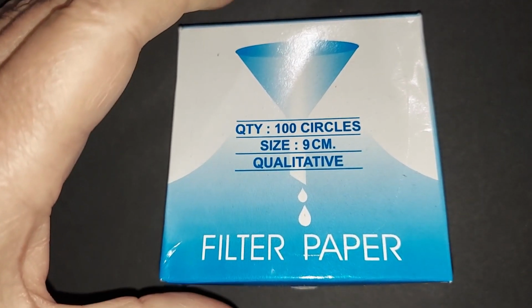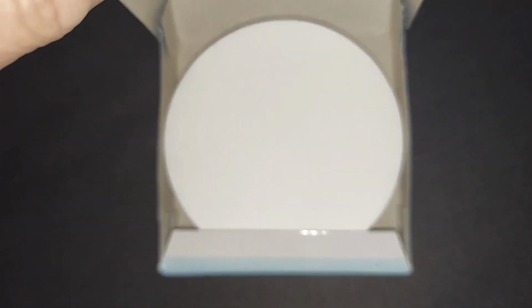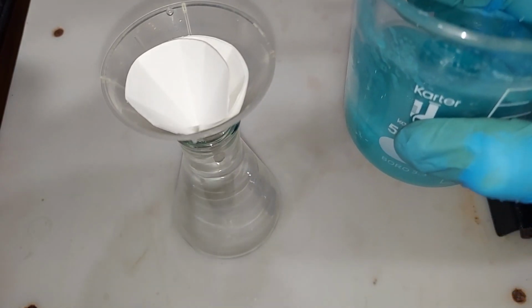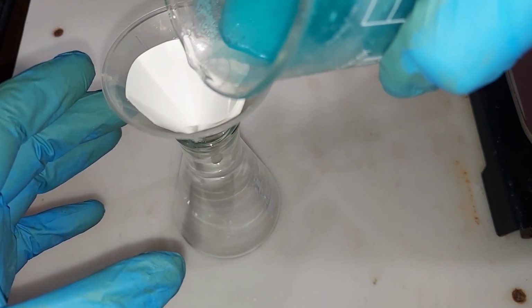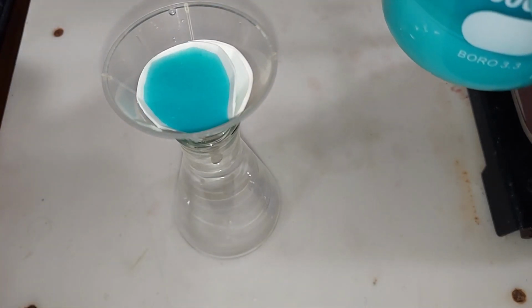So this arrived today. It's my 10 micrometer or micron filter paper. So let's go filter our copper carbonate. I'm going to start filtering the copper carbonate solution here. I did double filter paper this because I don't want to have to do it more than once. And I know this is going to be extremely slow. So what I'm going to do is come back periodically.